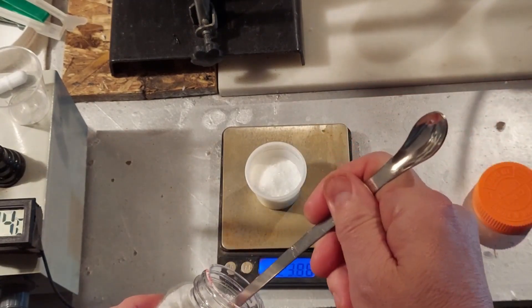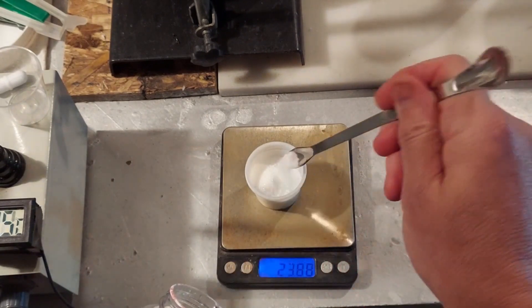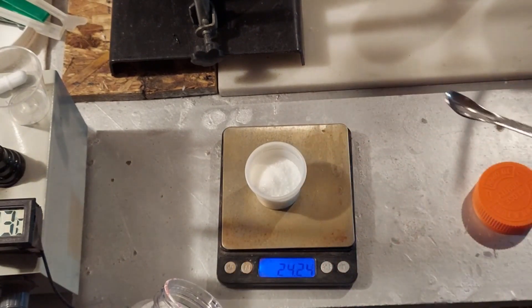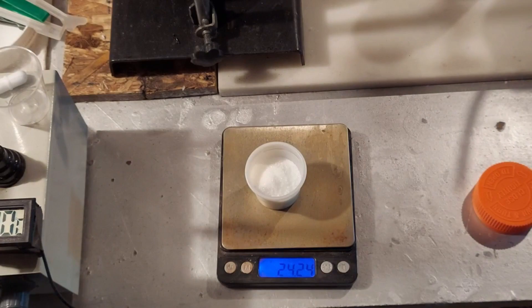23.88. Let's see what we can do. 24.24. Honestly, close enough.